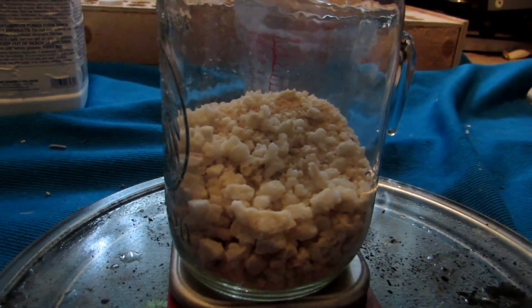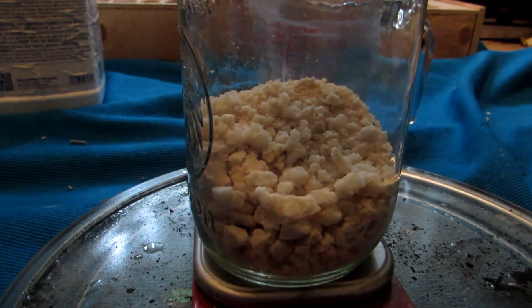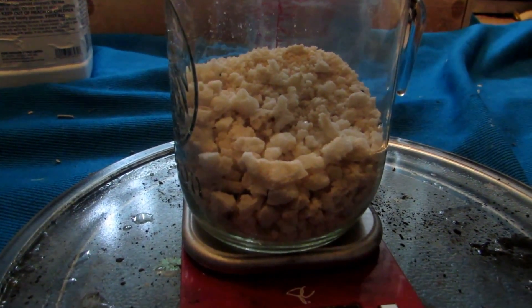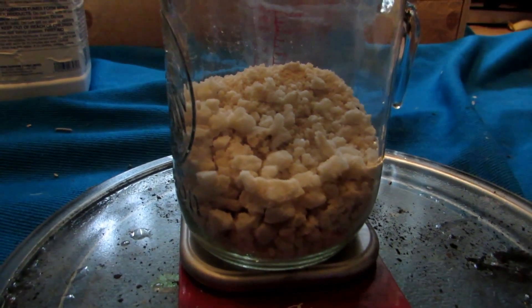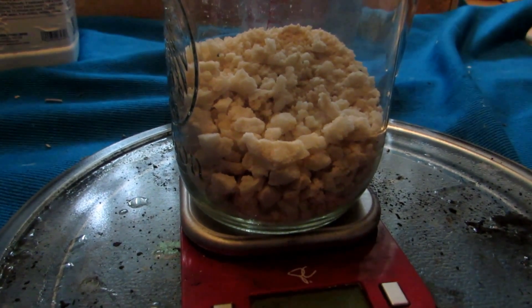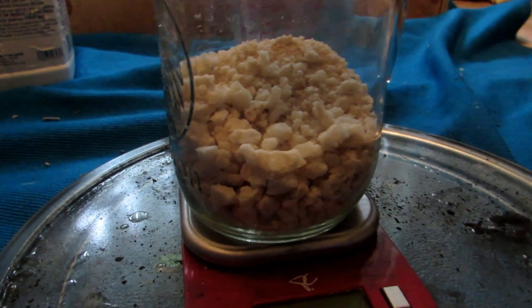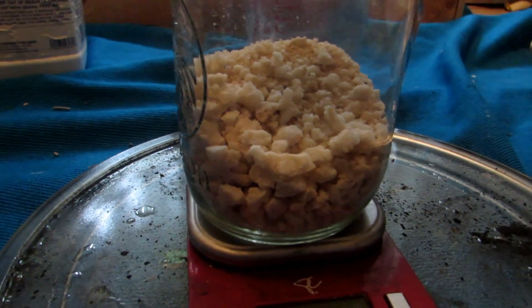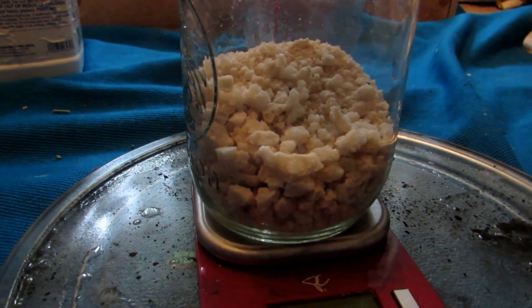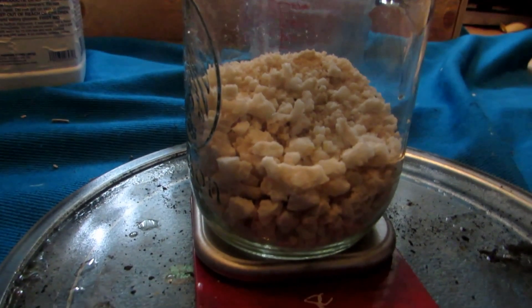Because there was still significant ammonia dissolved in solution, I couldn't let it evaporate inside, and it was too cold outside for much evaporation. Instead, I took a baking tray reserved for chemistry, poured the roughly 400 milliliters into it, and set it on very low heat on the hot plate outside to steam off all the liquid. This left us with a fairly nice white product, although sodium nitrate is very hygroscopic, meaning it absorbs water out of the air.